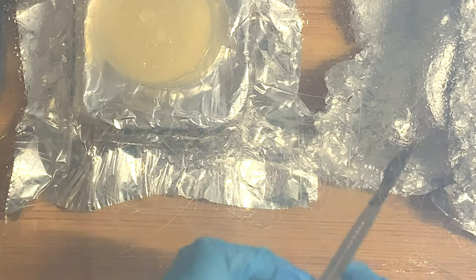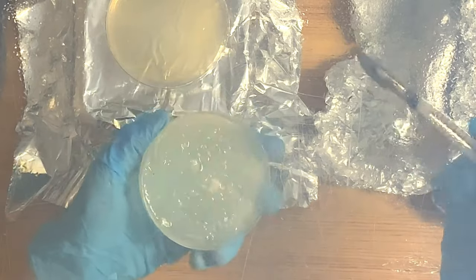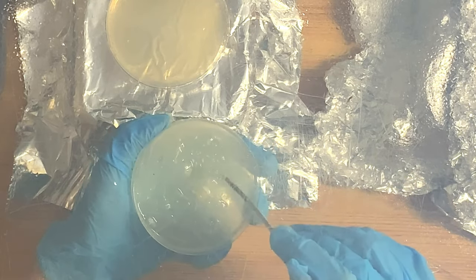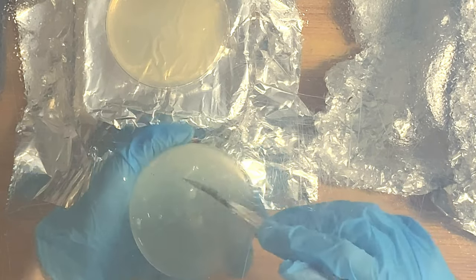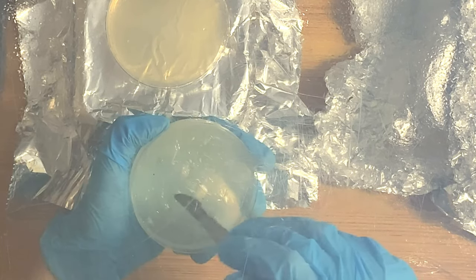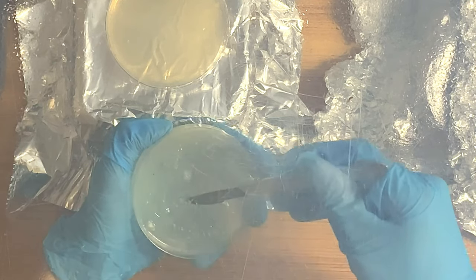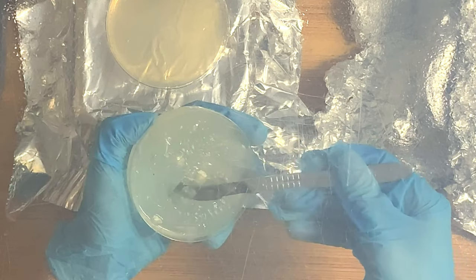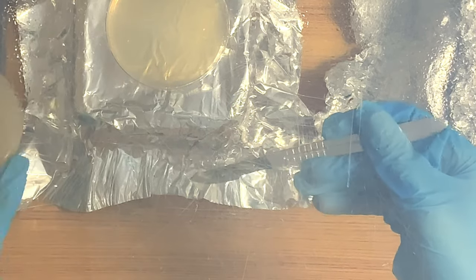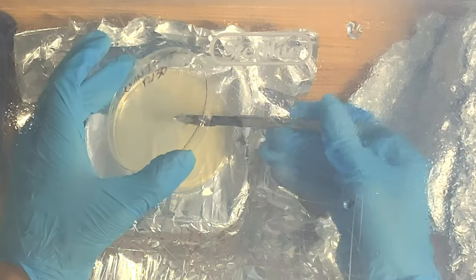So basically, after I got done making my syringe, the plan was to take that syringe and shoot a little bit of the mycelium water onto a new plate as a transfer. But I decided, you know what, let's have a little experiment here of sterile technique — I'm going to take the exact same plate that I slurried and take a transfer from there. Remember, it's been open for a while now, and I'm going to put it to a new plate and see how it goes. How do you guys think it fared? I will show you at the end of the video.